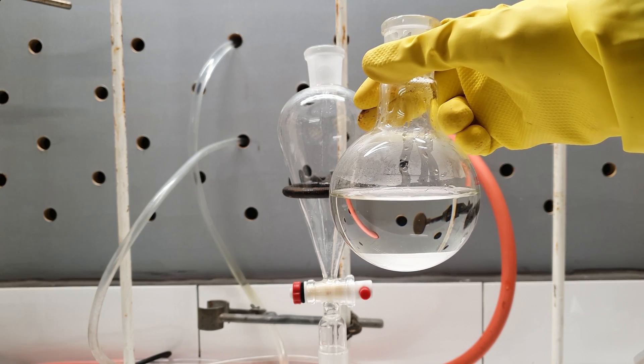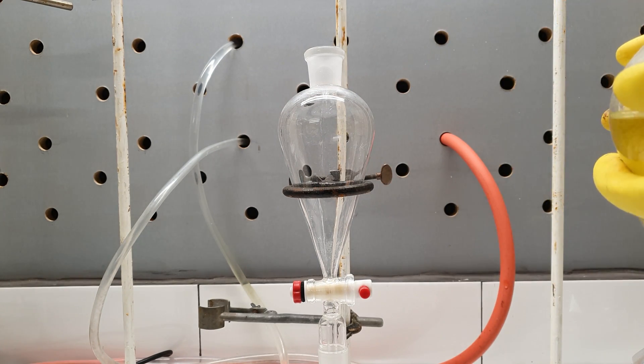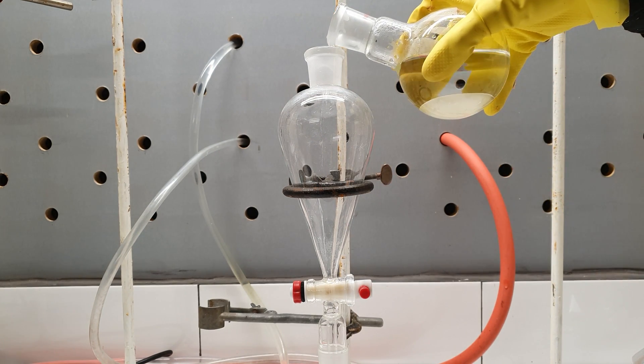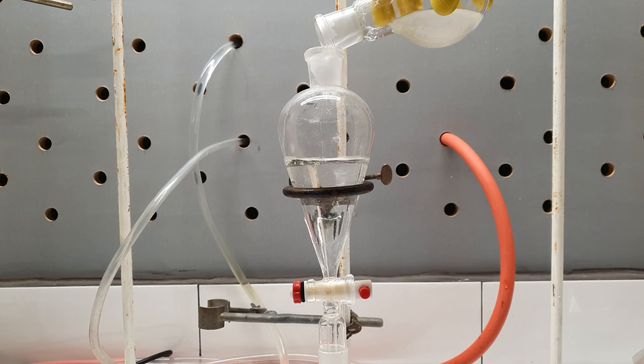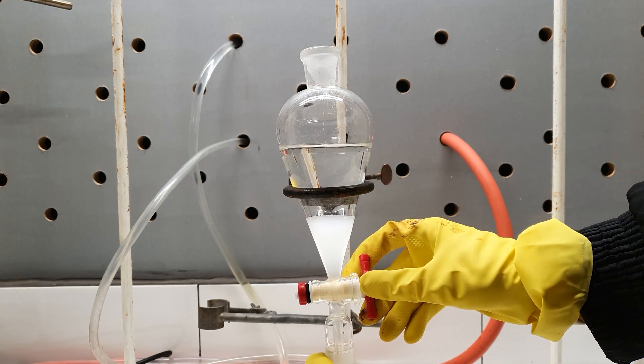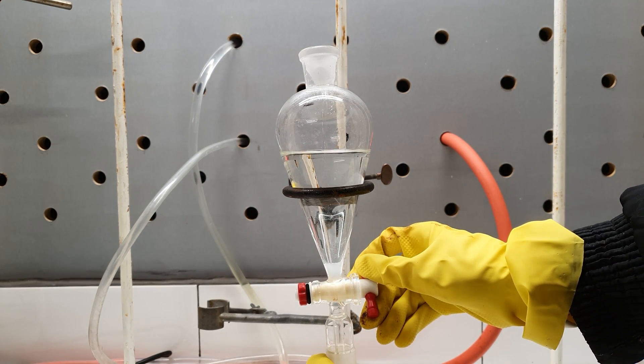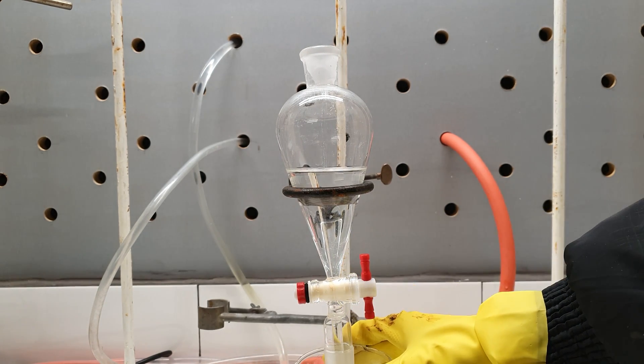This is how the flask looked like when I stopped the distillation. I had to separate the nitromethane layer from the water, so I poured it in the separatory funnel.